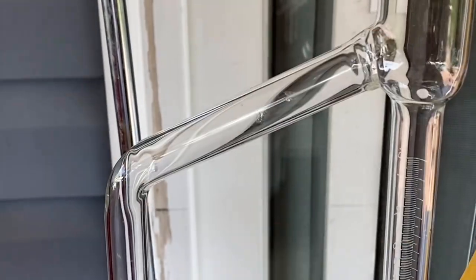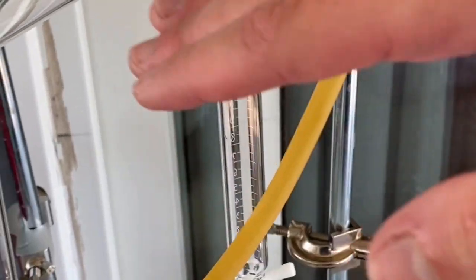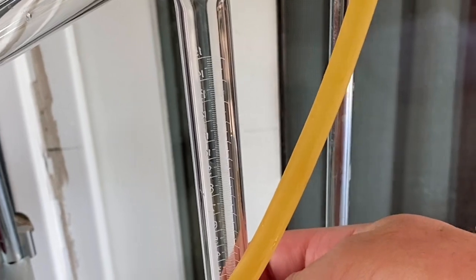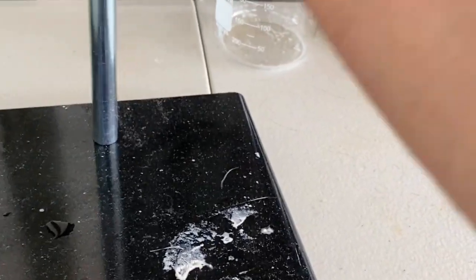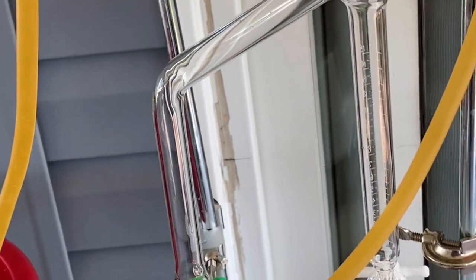And so we have a feedback loop. And if need be, if there's too much water that the water starts to drip back, we can let the water out with this little fancy nozzle. Make sure it's closed, obviously. That's closed. We don't need it dripping out while it's refluxing.